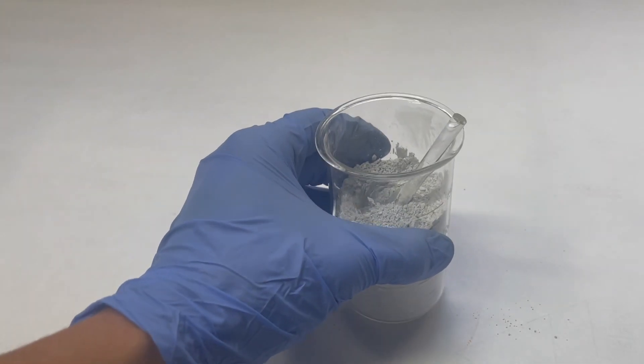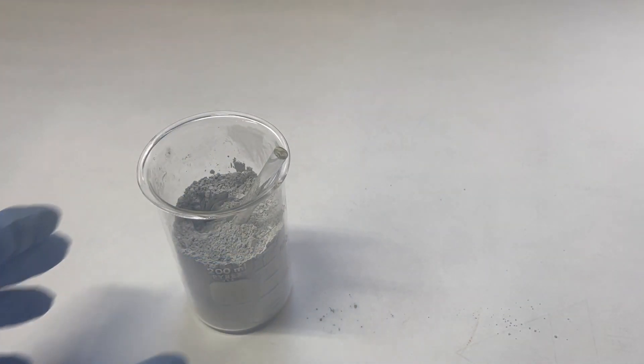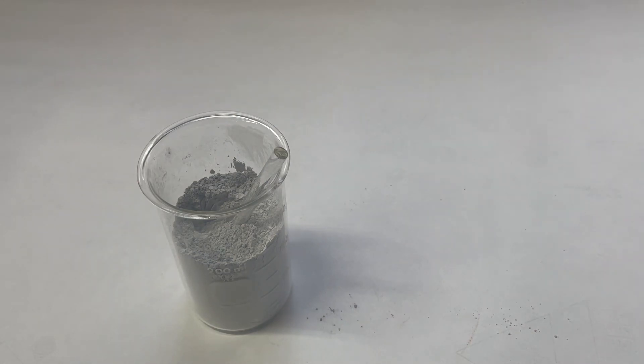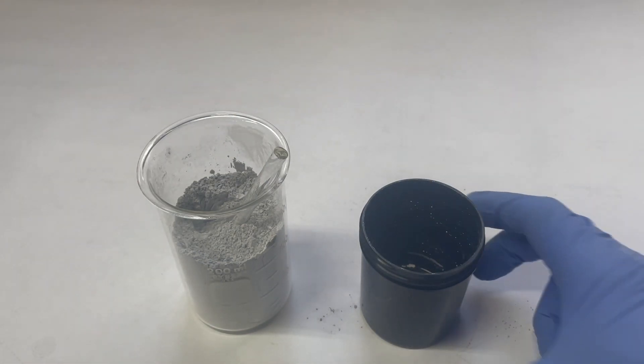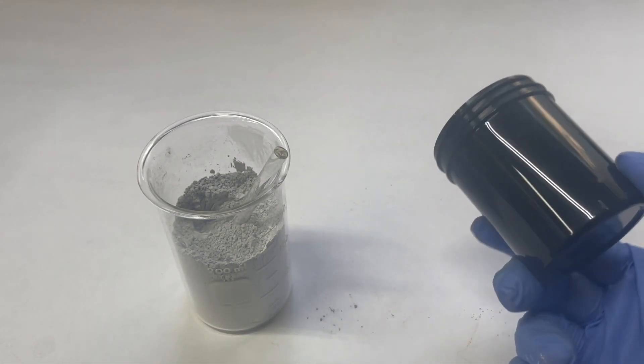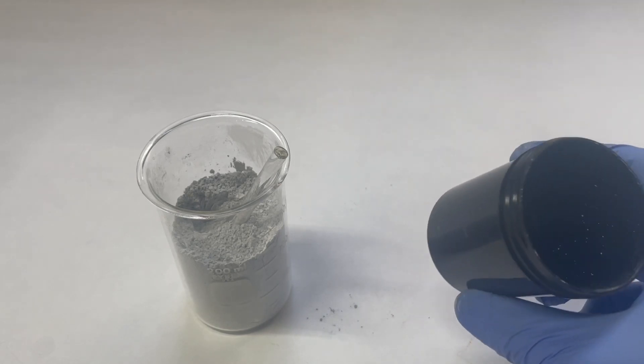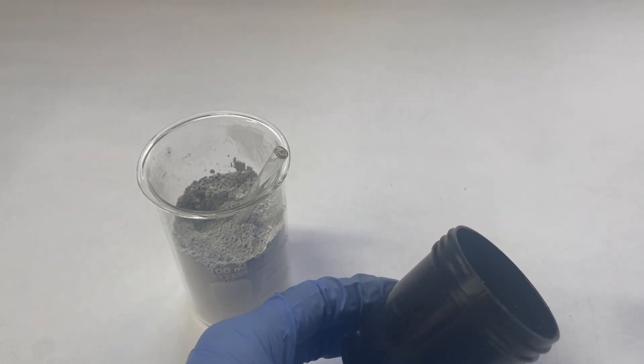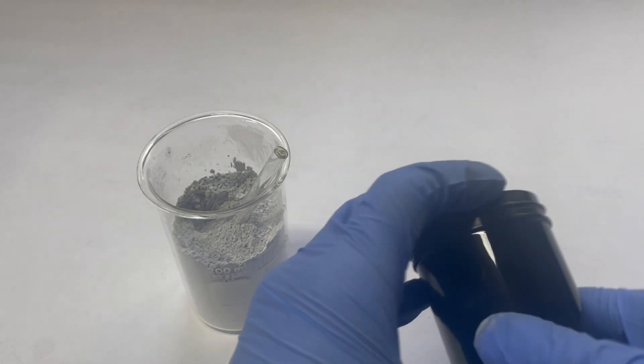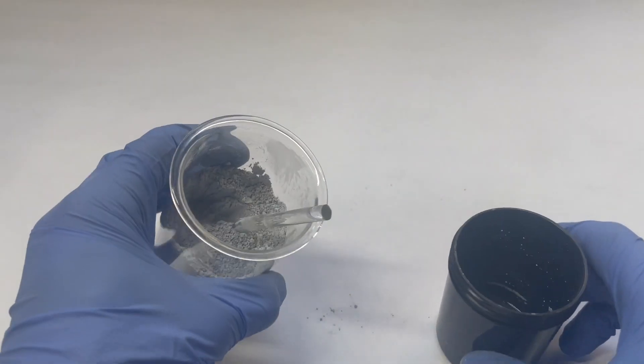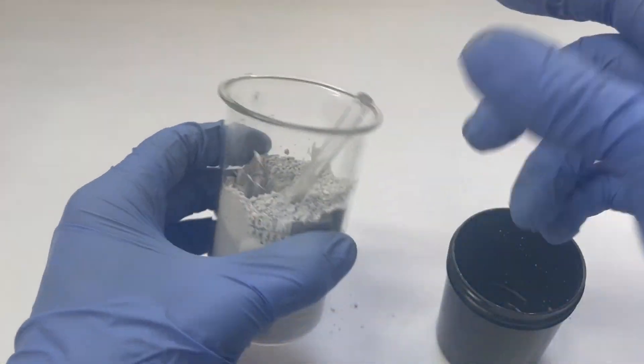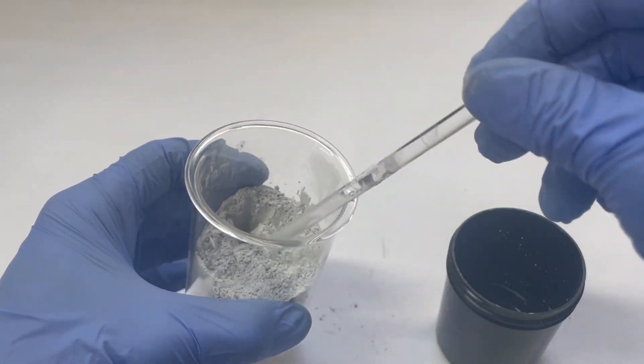Now that we've got our mixture all mixed up, we can transfer it over to something that we can add the water to. I like to use these small plastic bottles because they're nice and they don't stick to it, and I can push it out and crack the plastic off, and it lessens the chance of breaking a nice beaker, such as this one.